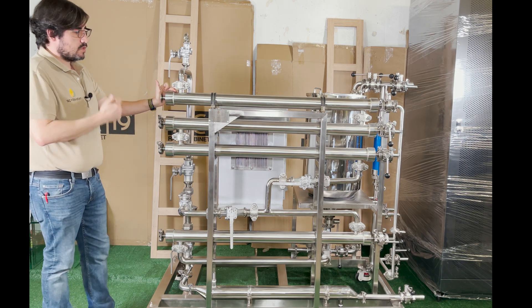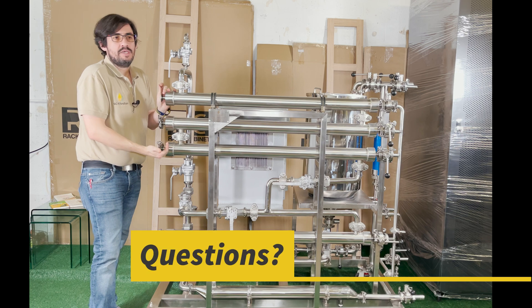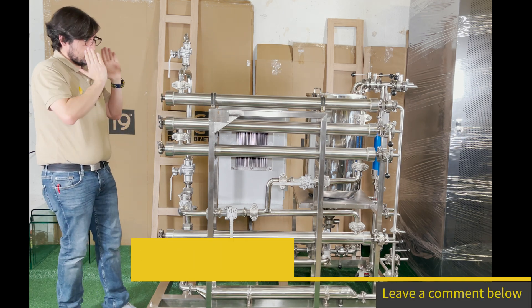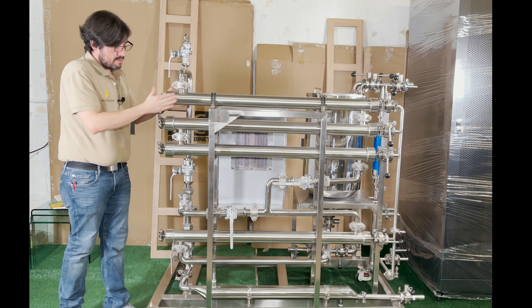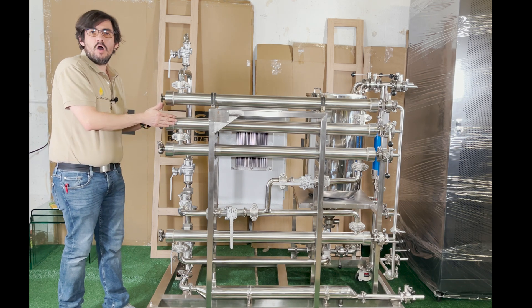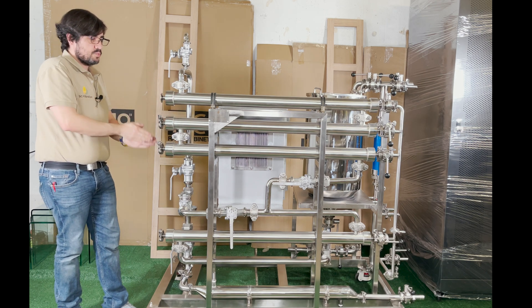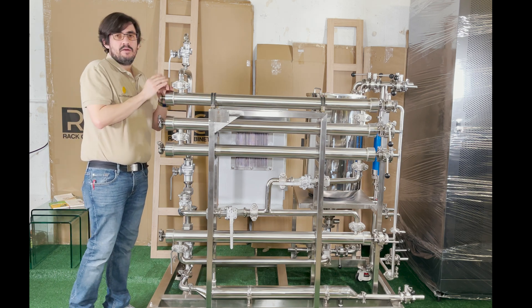Parallel flow refers to having your vessels flowing in parallel, where your fluid comes in one side and flows through one membrane and all the subsequent membranes together at the same time. So one pipe feeds these three housings together — that is parallel.